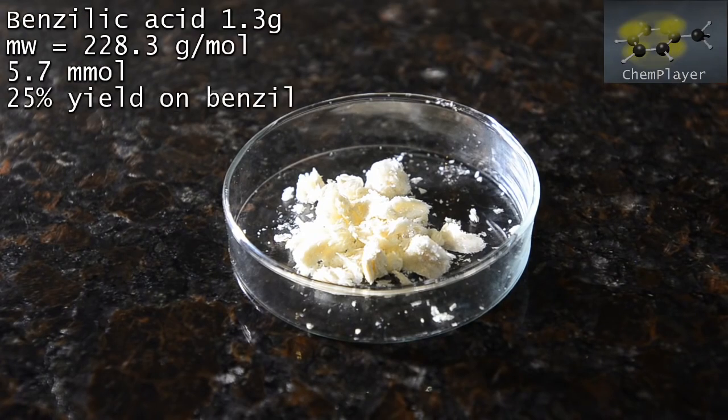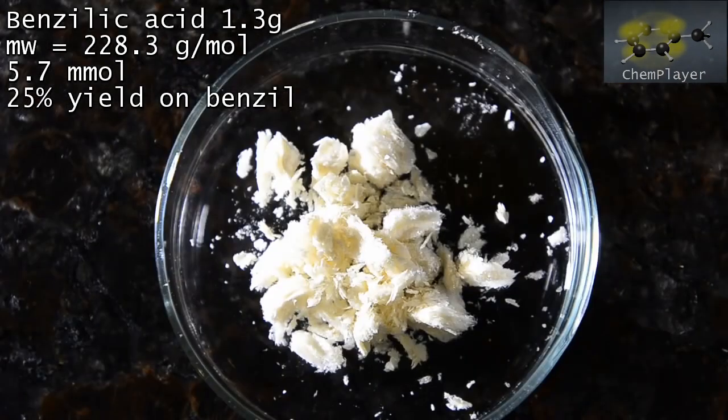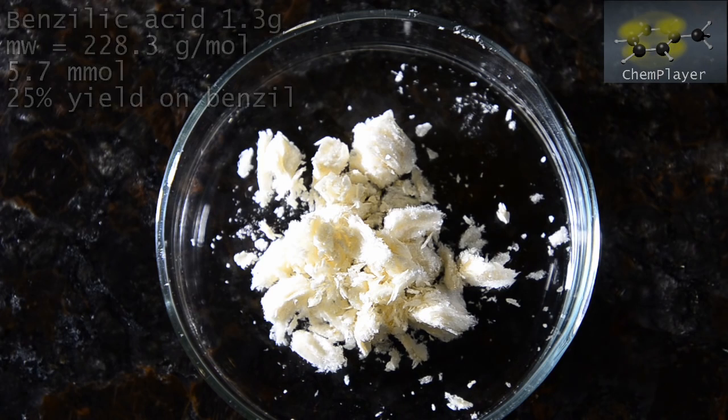Benzilic acid as silvery flaky crystals. It looks a little bit like phenylacetic acid, only it has a very slightly faintly sweet sugar aroma. The final dry weight was 1.3 grams and this corresponds to a 25% yield on our starting benzil. This isn't a great yield, so perhaps we added too much potassium hydroxide, or perhaps we boiled the mixture for too long. But it seems very pure and we're pretty happy to have isolated a nice pure product.